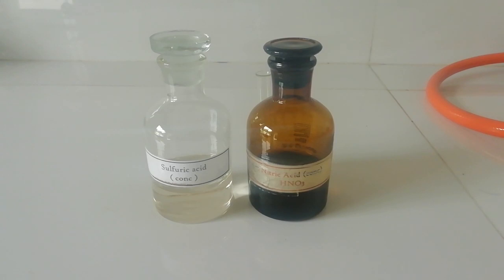During the steps, I need red fuming nitric acid, so I decided to make some. I will post about M-nitrophenol synthesis in the future. Today I am going to make red fuming nitric acid.